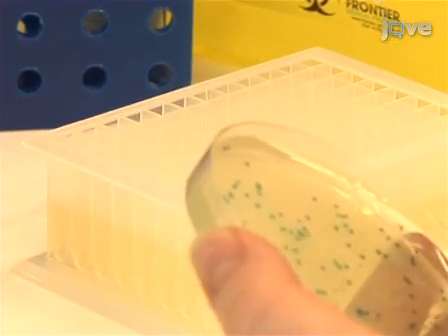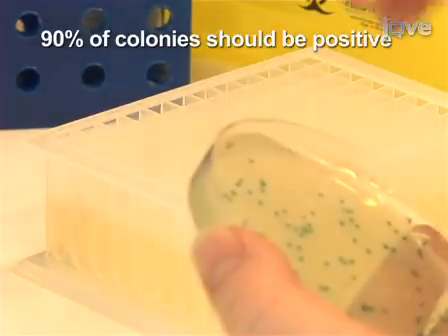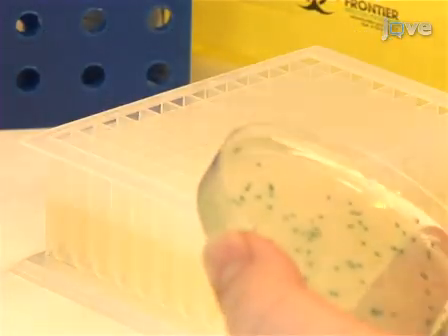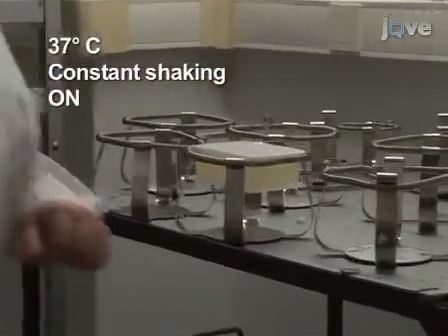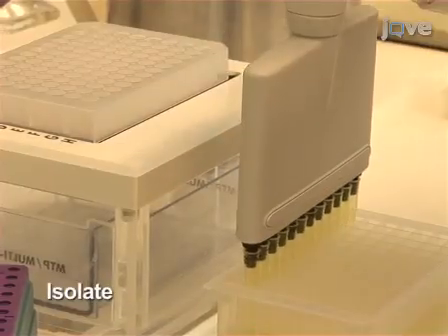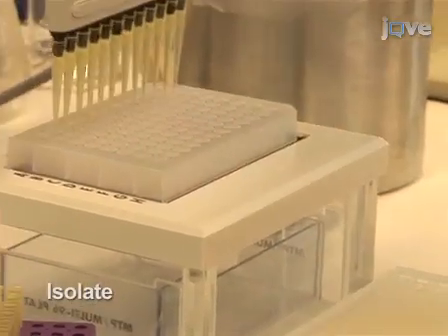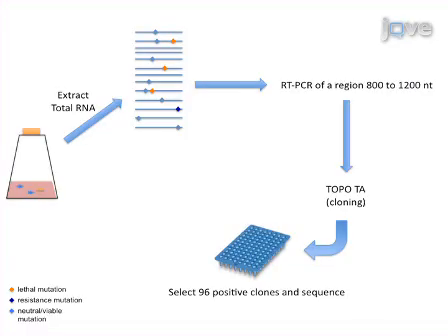For each positive white colony, use a toothpick to transfer each colony to 1 ml of LB medium in 96 well bacterial culture plates. Incubate overnight at 37 degrees Celsius with constant shaking. The next day, isolate the DNA by preparing mini preps in a 96 well format. Sequence each plate with enough primers to obtain maximum coverage of the cloned segment. 2 primers of 600 base coverage should be enough.